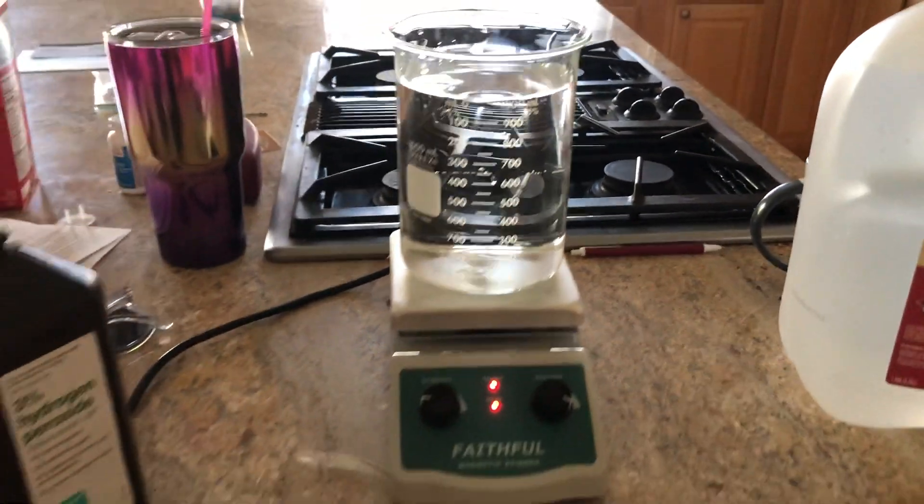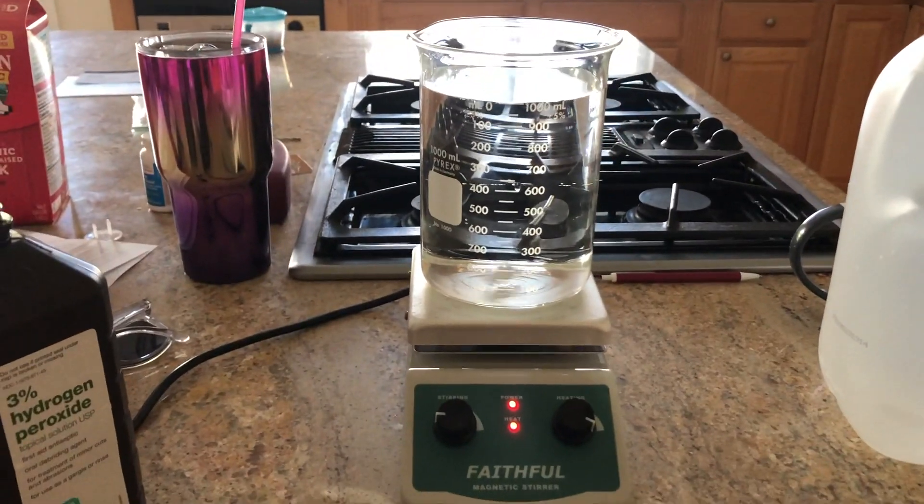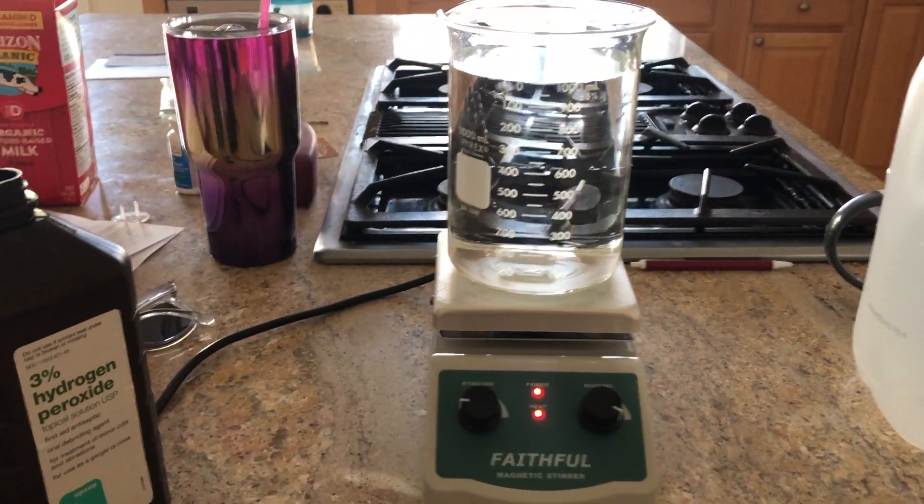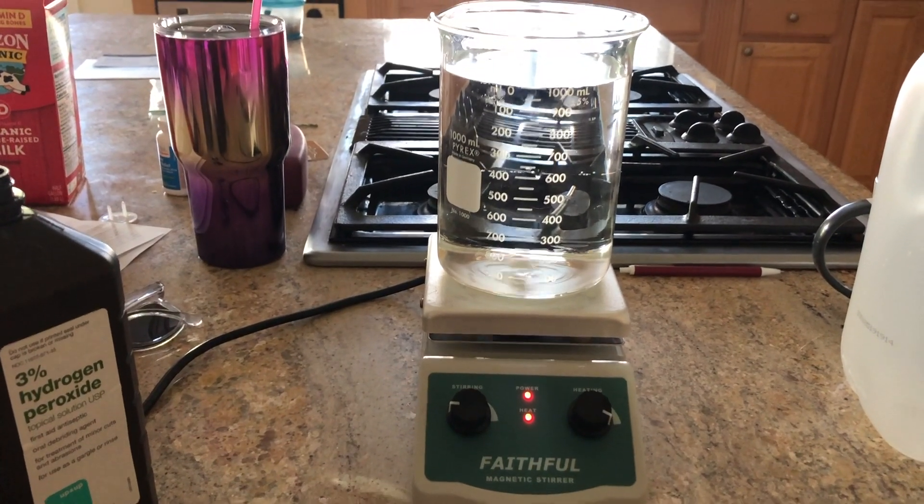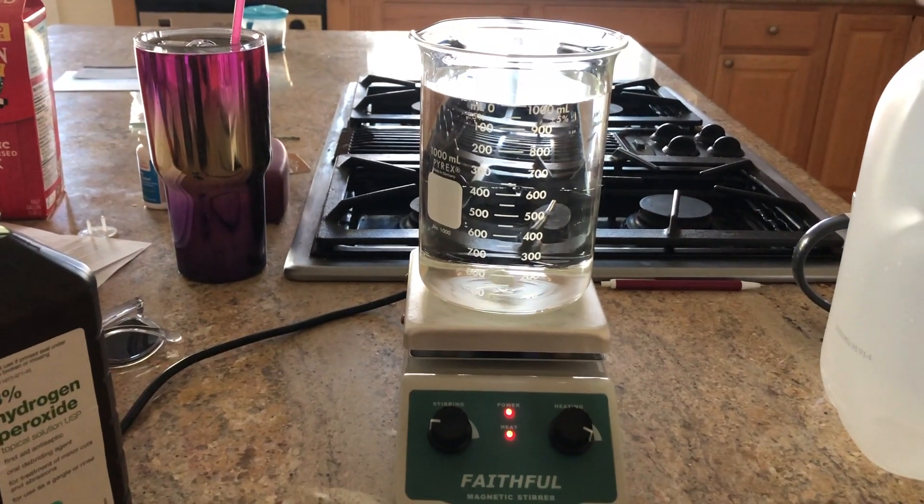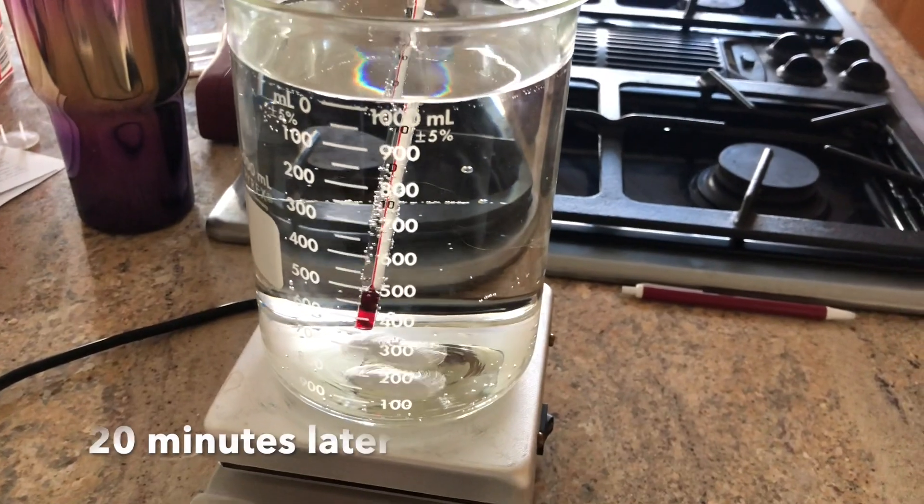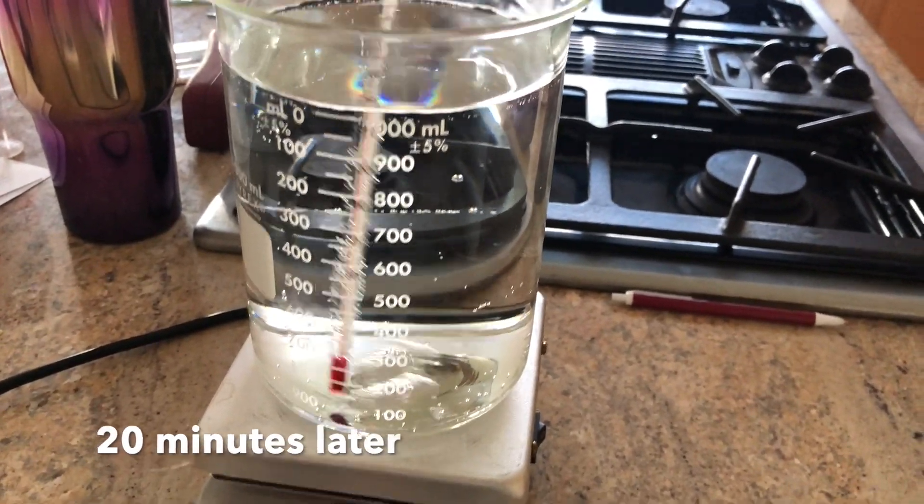We're gonna boil one liter down to 100 milliliters a couple times so we end up with about 300 milliliters and then we'll take it up to 90%. Right now we're still only about 54 degrees.